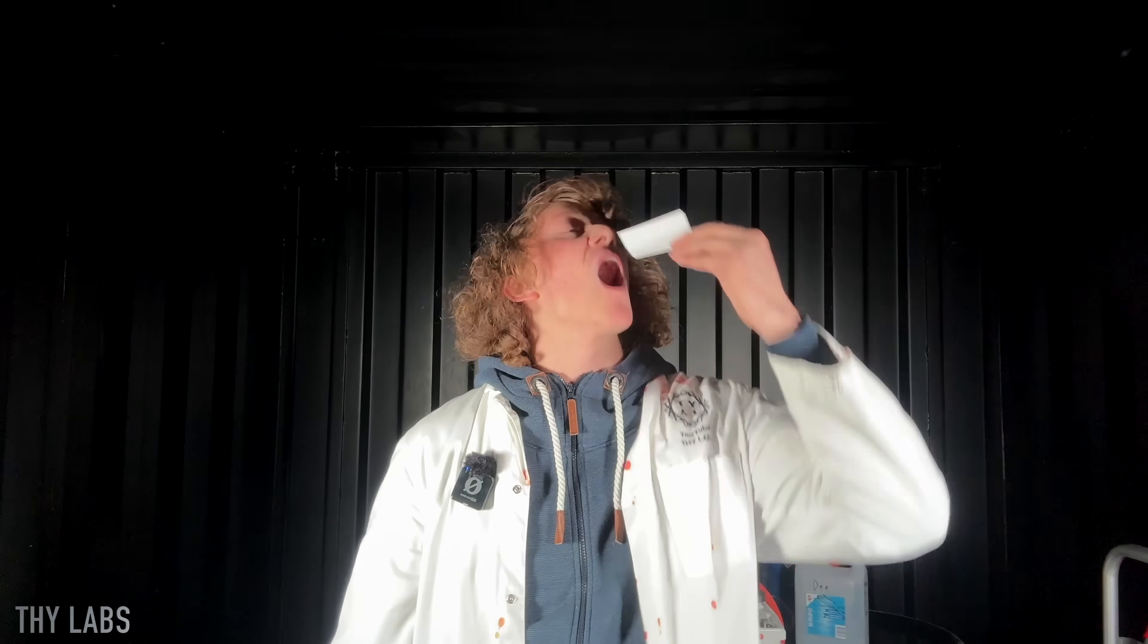So I'll weigh out some of the product and I'm just gonna try it and see what happens. First I thought it didn't have any taste, it's just sand-like, but the taste that it has is somewhat similar to camphor. I'm gonna wait for an hour and then report back.